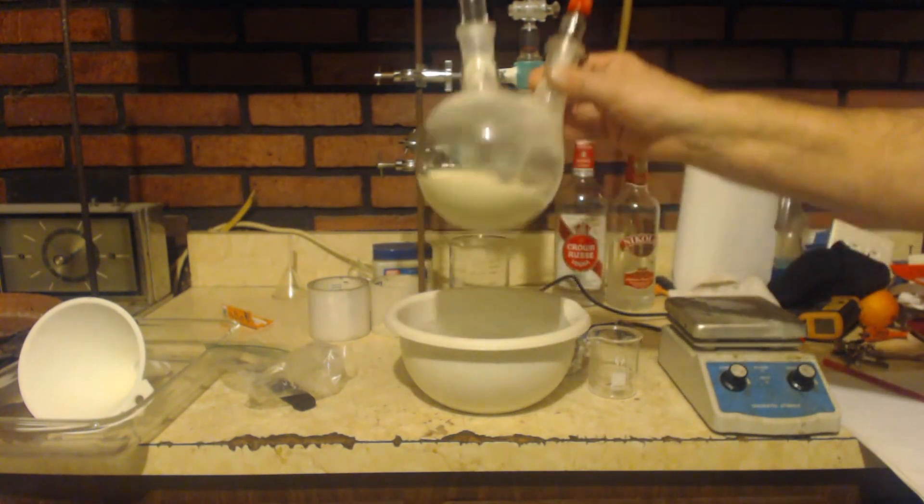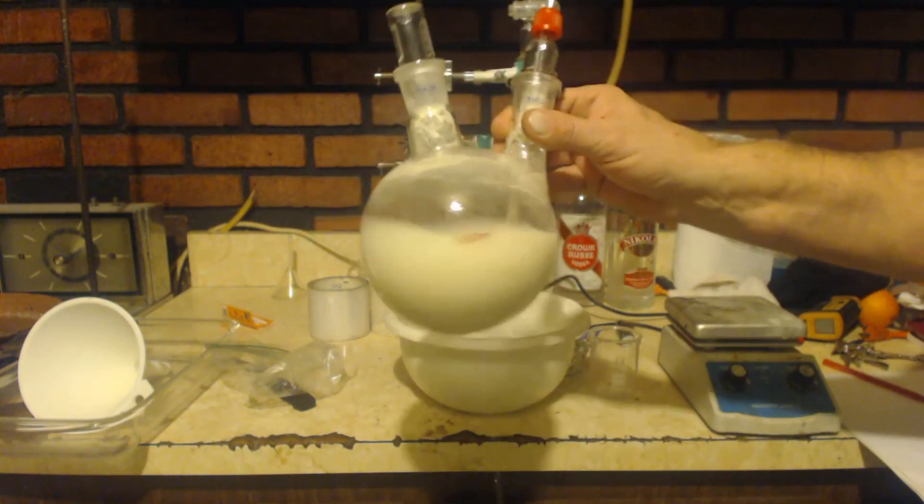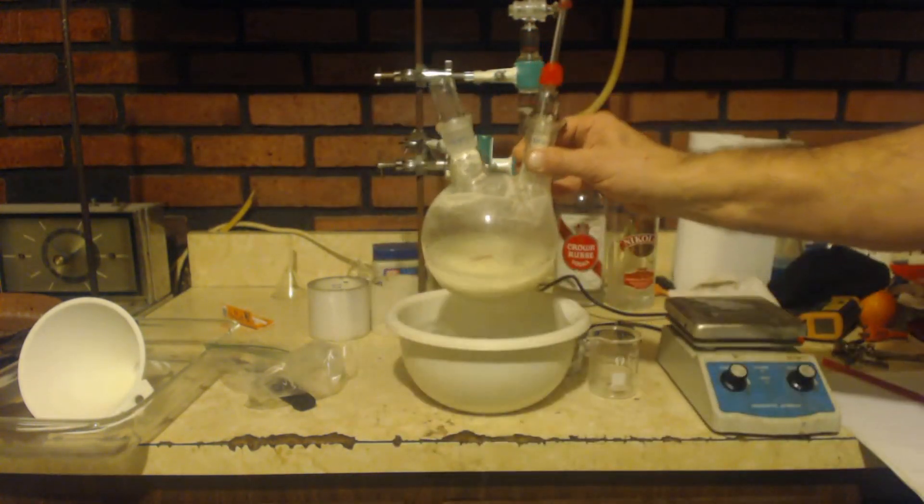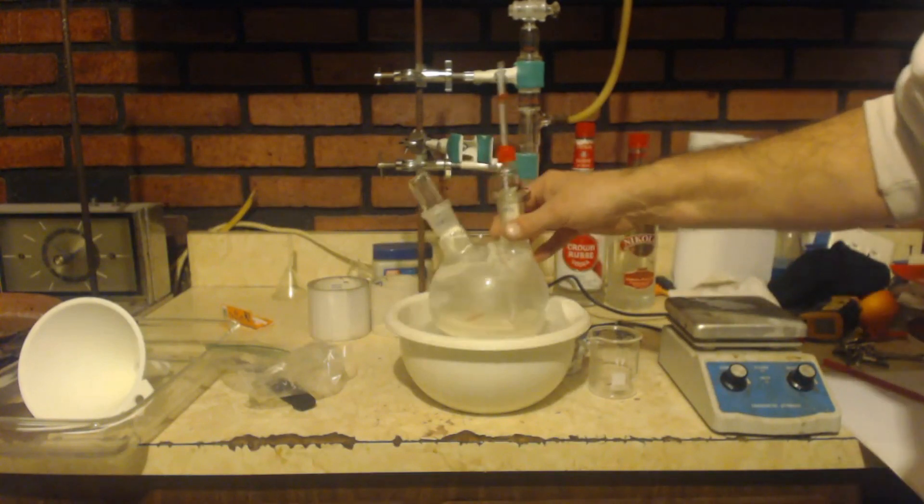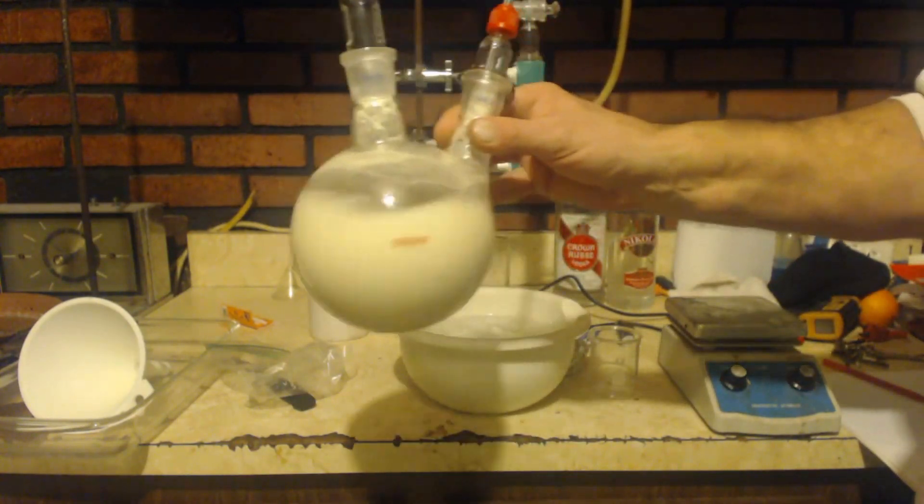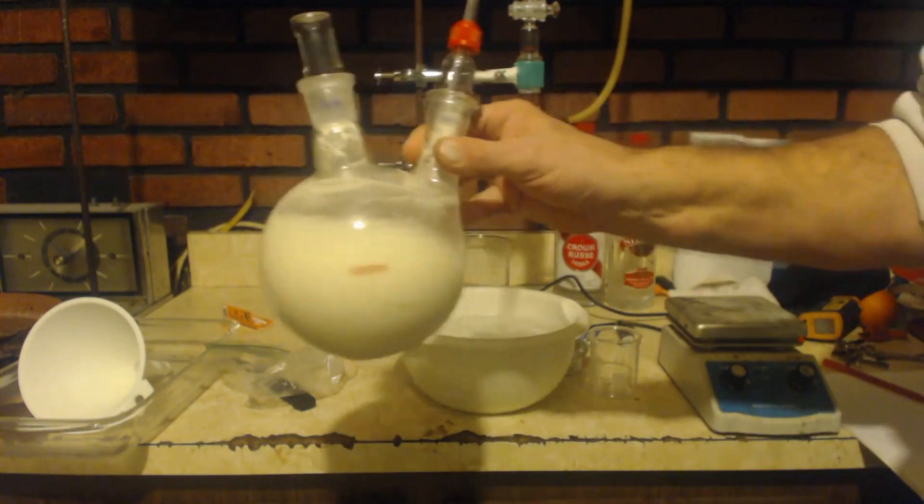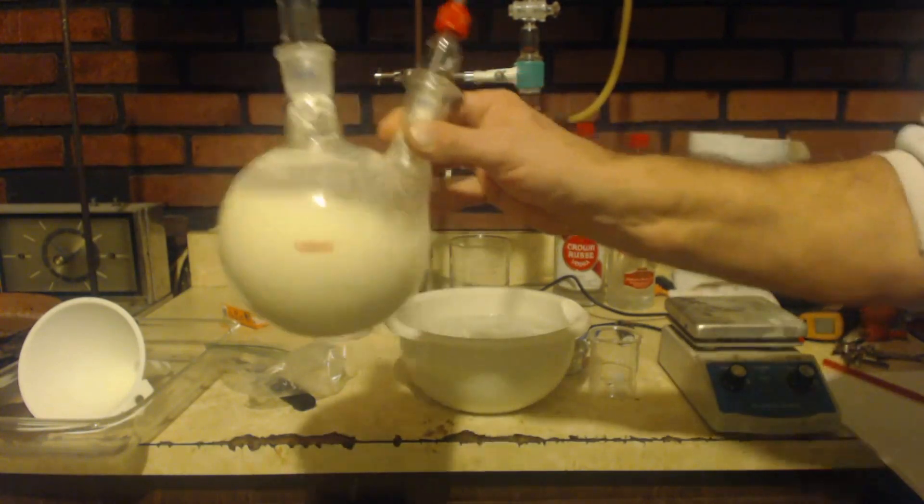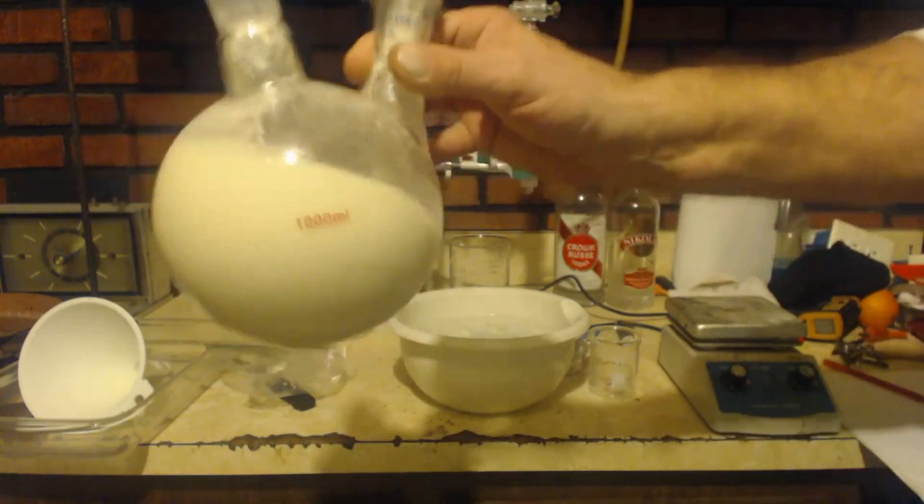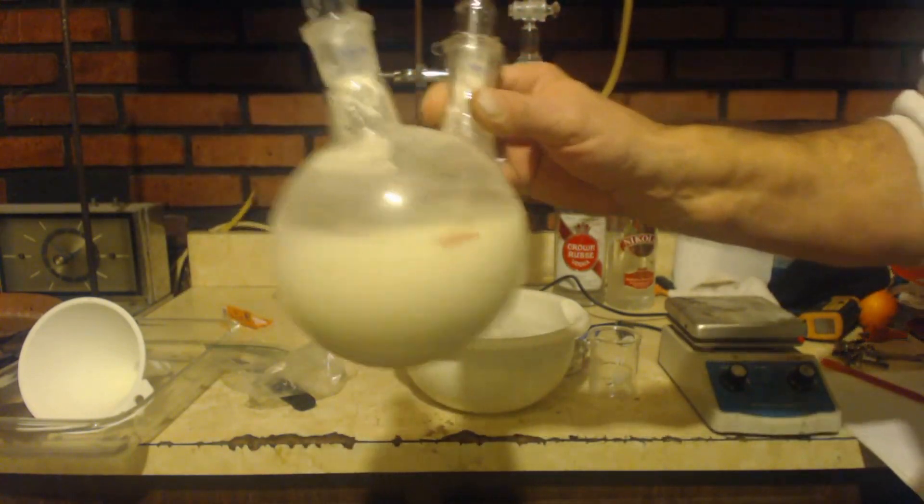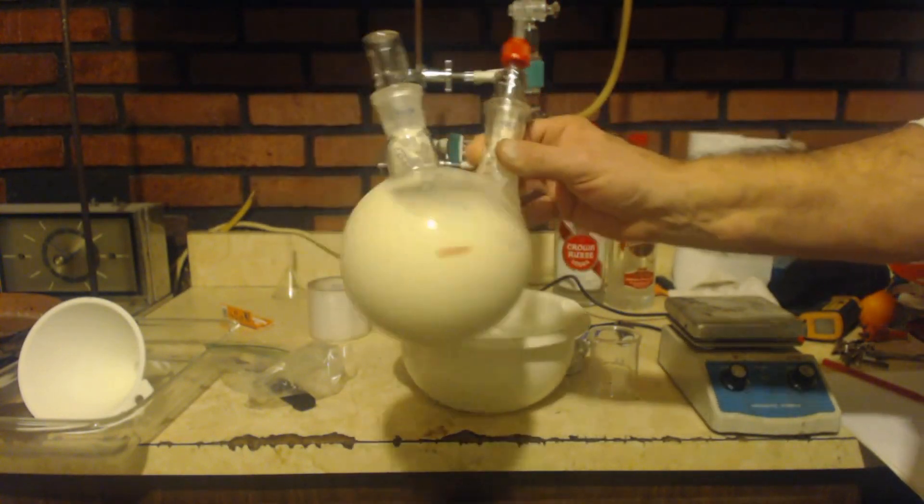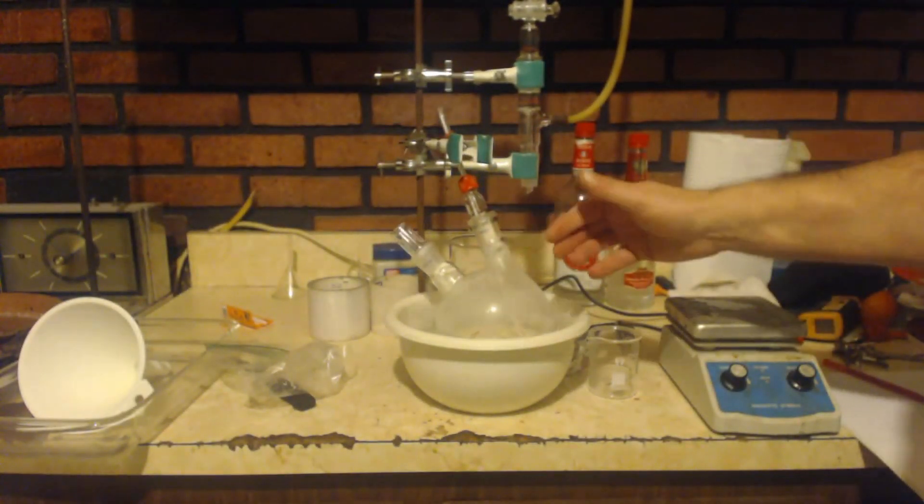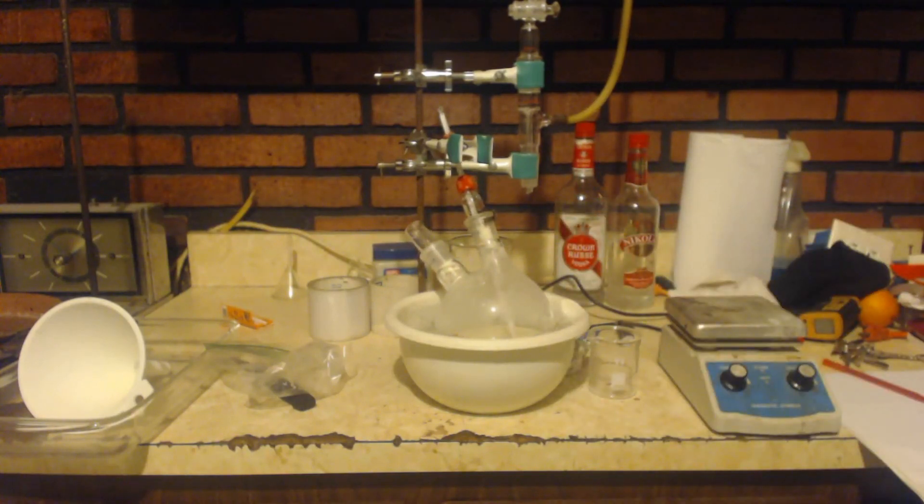But once I put it into an ice bath here like this, it kept the temp down. It took me an hour and a half after that first initial charge. An hour and a half. Now, the next half hour, I put the next 93 milliliters in there. And I kept it between 0 and 5 degrees Celsius. Right now, I think it's about 6 degrees Celsius. Now, at 4:30, which was just like 5 minutes ago, I'm just shaking it. And I let it sit for a little bit to get cooled down or whatever. I'm going to do this for at least an hour.